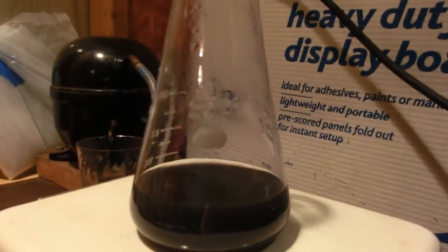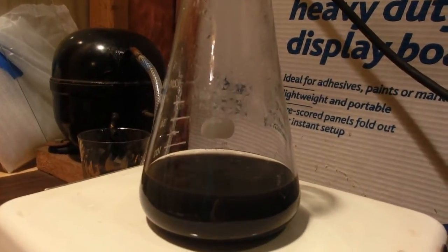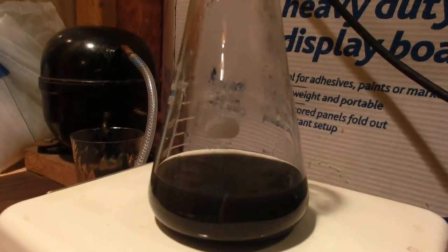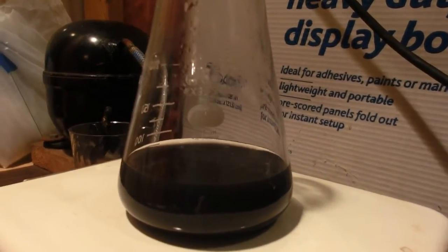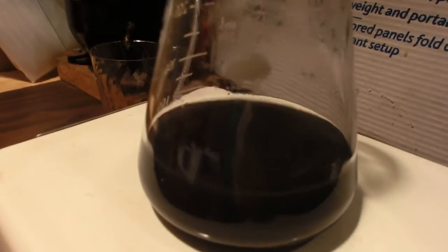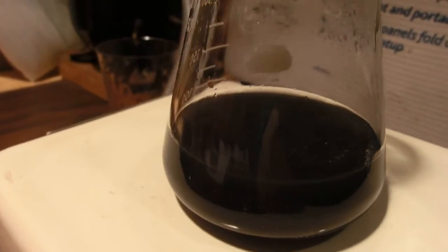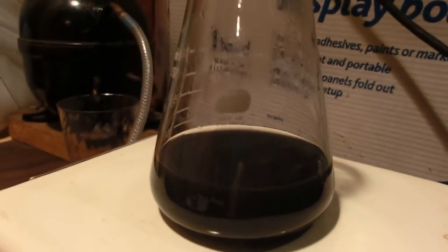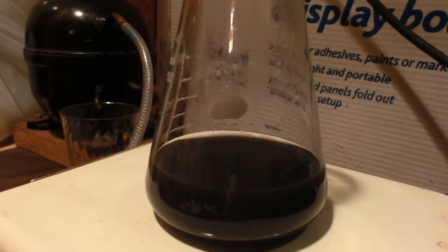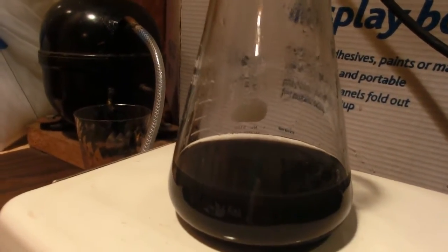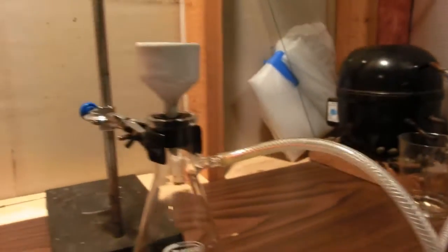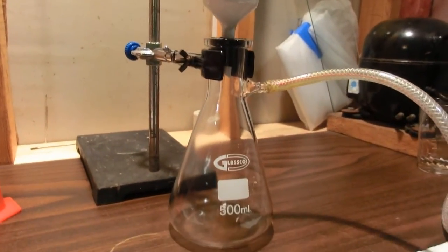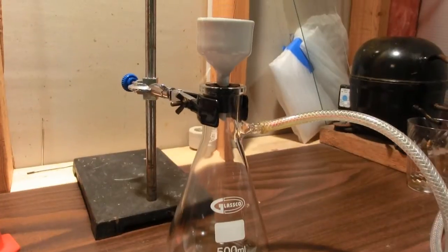Okay, it's been probably about 30-35 minutes since the solution began boiling and you can see there's no more effervescence, no more bubbles being produced there. So I'm going to go ahead and turn this hot plate off, let it cool a little bit and use this vacuum filtration that I've set up here.